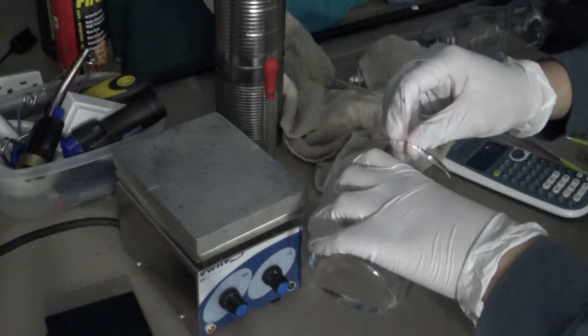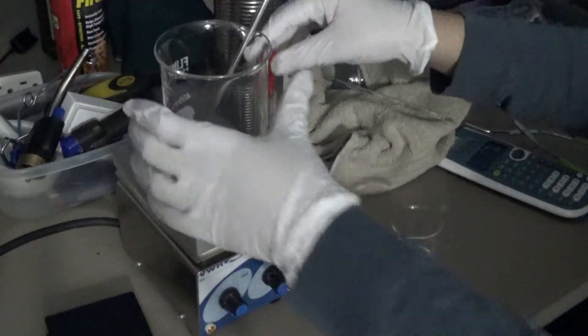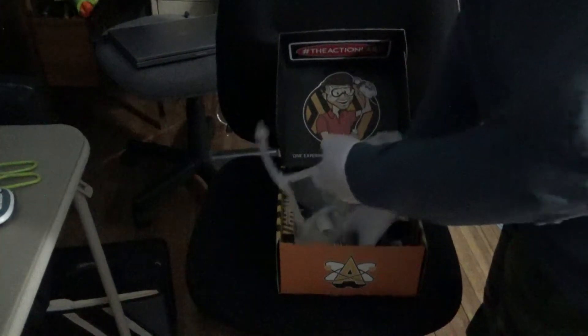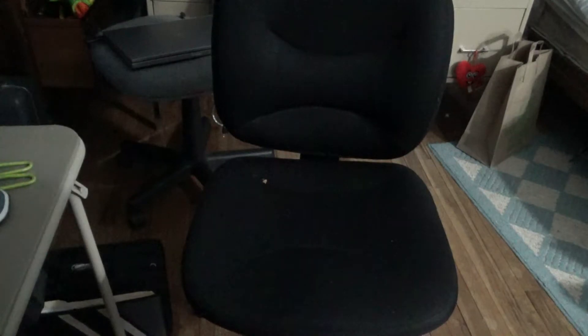Excellent. Okay, so I'm going to use my Action Lab vacuum chamber kit for this. Pretty nice little kit here, and the beaker should fit just fine. If you want to see the video where I reviewed this, link will be up there. Pretty cool little kit here, so it should work just fine for what we're doing.